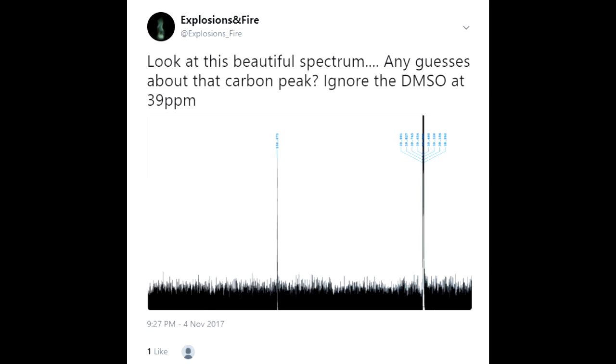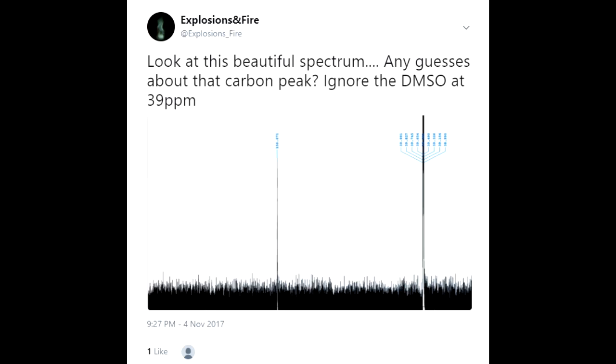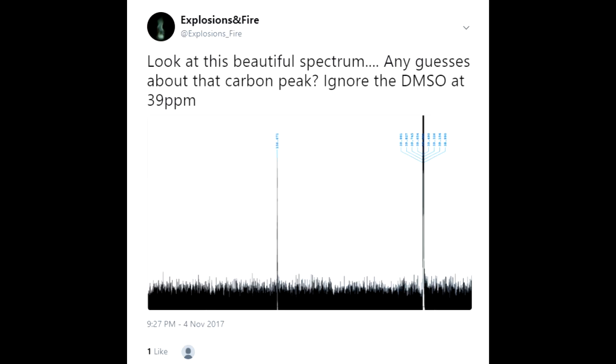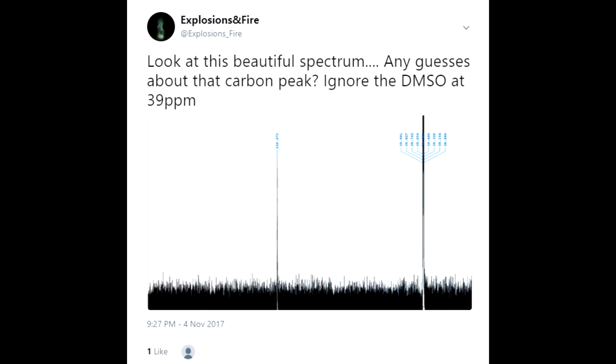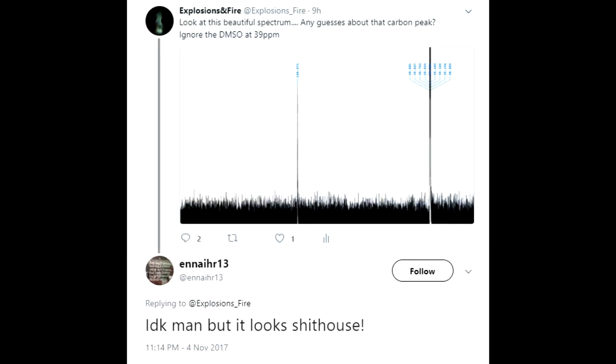Look at this beautiful spectrum — any guesses about that carbon peak? Ignore the DMSO at 39 ppm. I don't know man, but it looks shithouse.